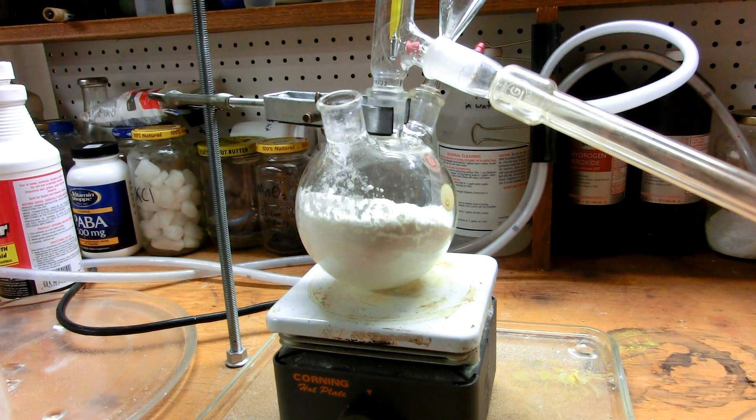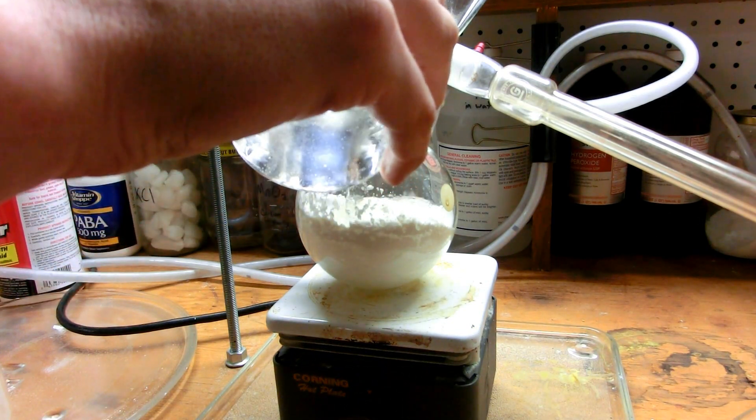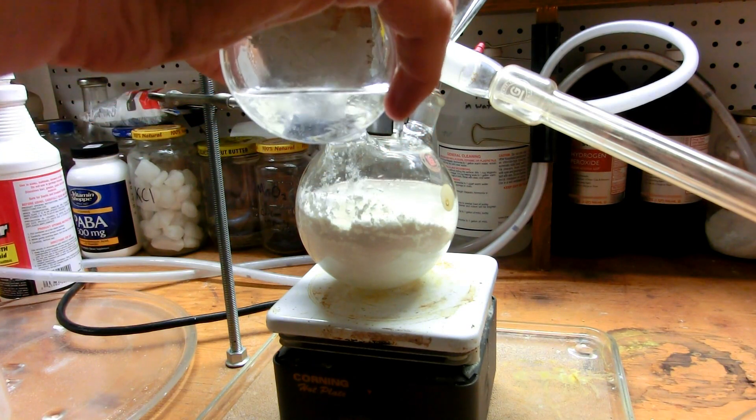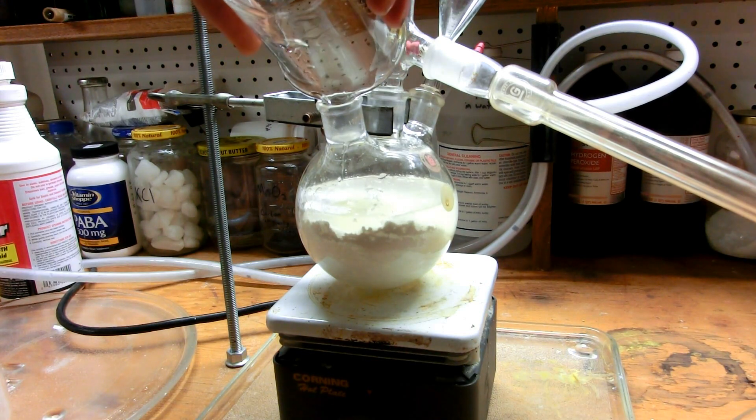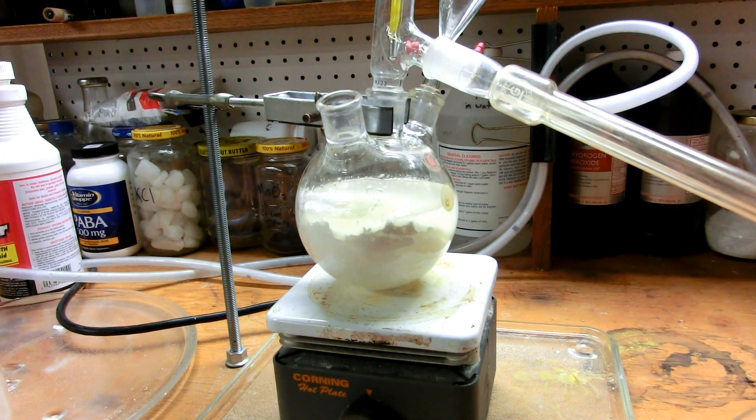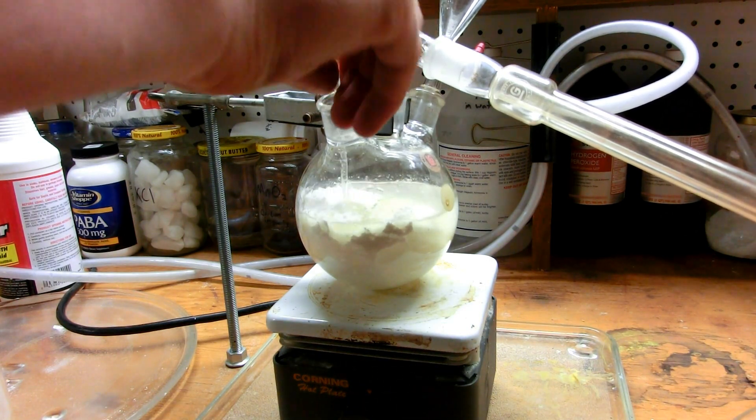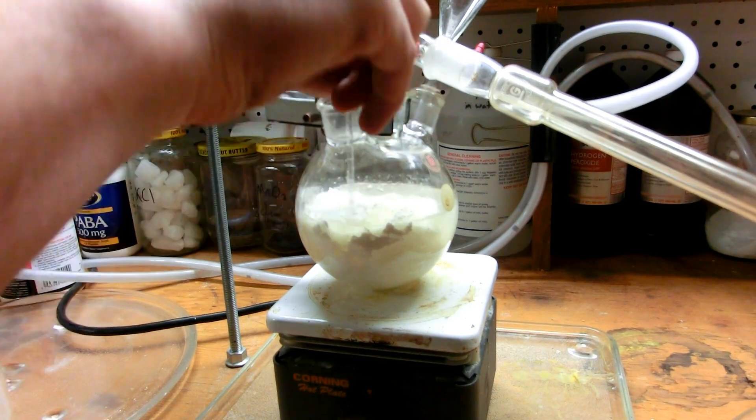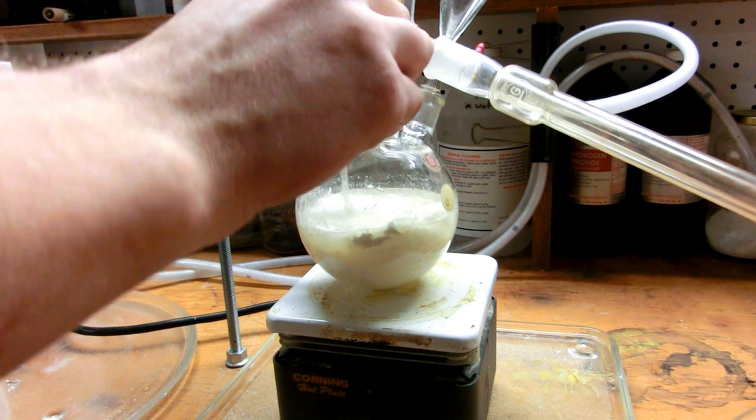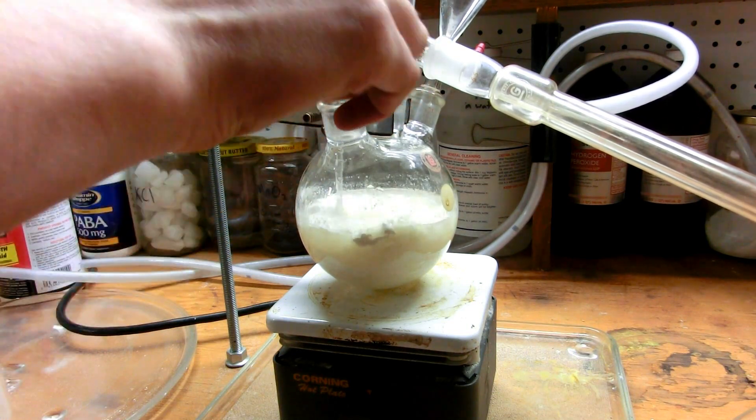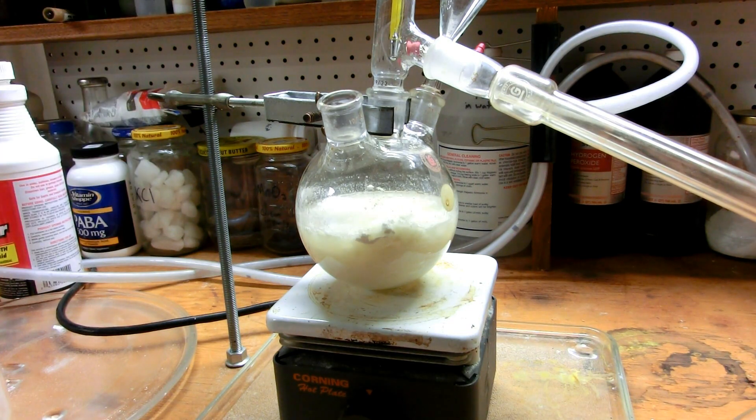First, we're going to add the calcium ammonium nitrate as this solid. There we go. That's all the calcium ammonium nitrate. Then we're going to push that down a little bit with a stirring rod so we don't have an issue with clogging up and bumping. Second, we are going to add the water. This is a very specific order. You always add acid to water, not the other way around.